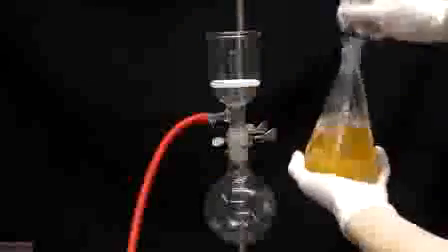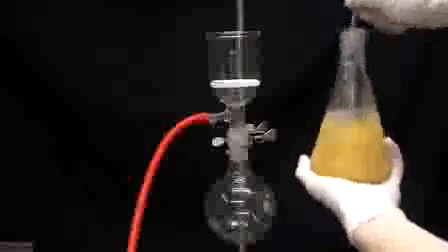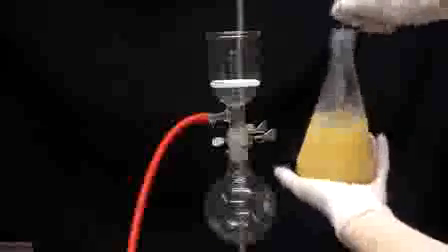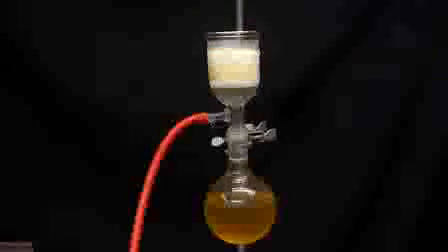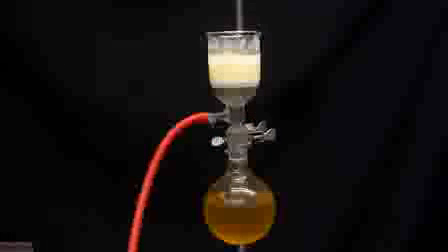To fully crystallize everything, I place it in the freezer for a few hours, and you can see that there are a lot more crystals now. To separate our crystals from the methanol, it's very simple. We just break up the crystals, and we filter it off using vacuum filtration. Once everything's been added to the filter and we've pulled a vacuum, I washed it a few times with a little bit of cold methanol. You can see that after just a few washings with the methanol, the crystals seem to have lost their yellow color and they're fairly white.